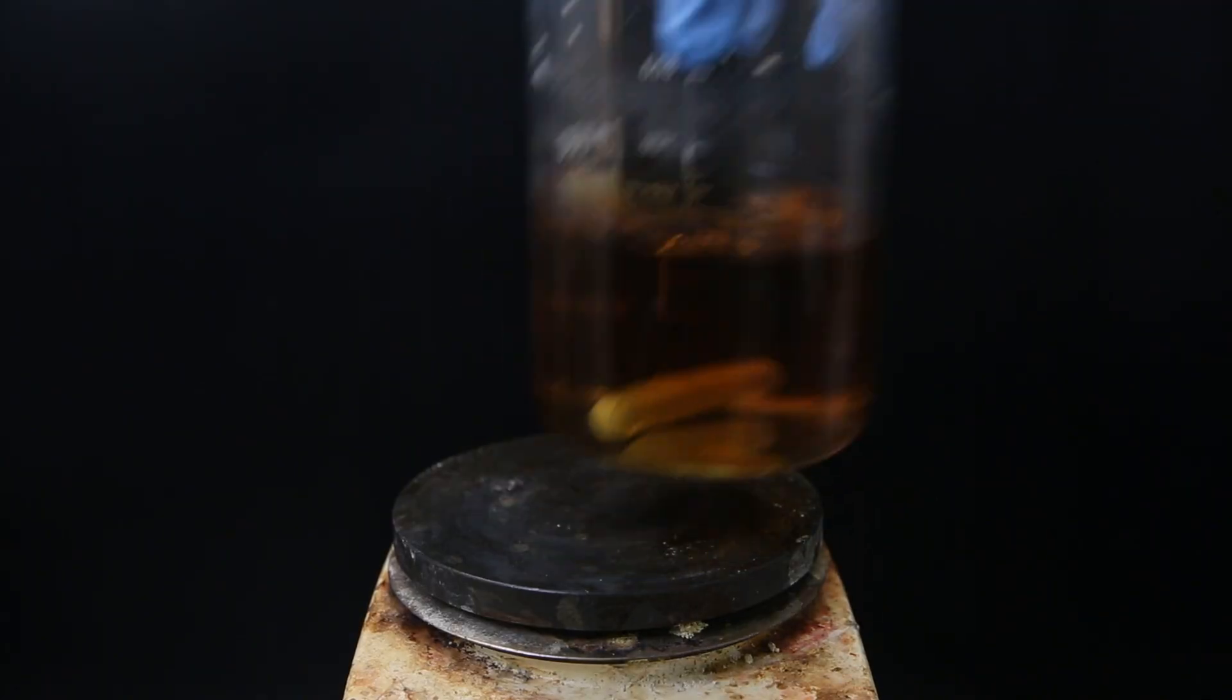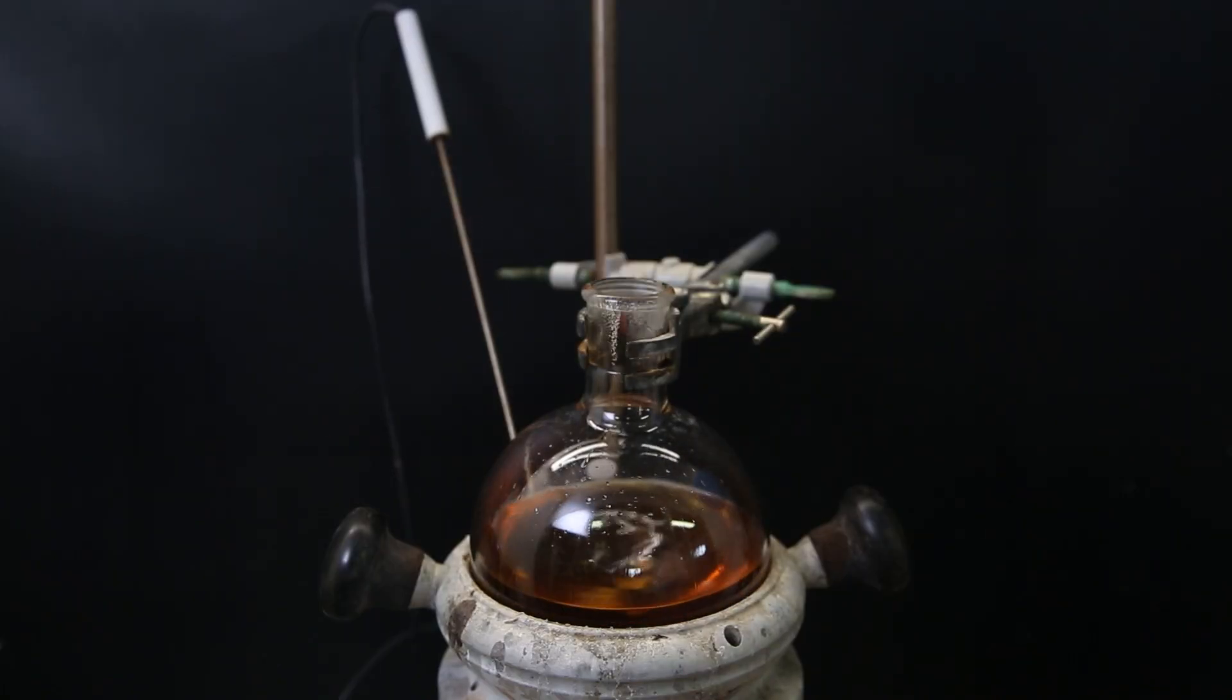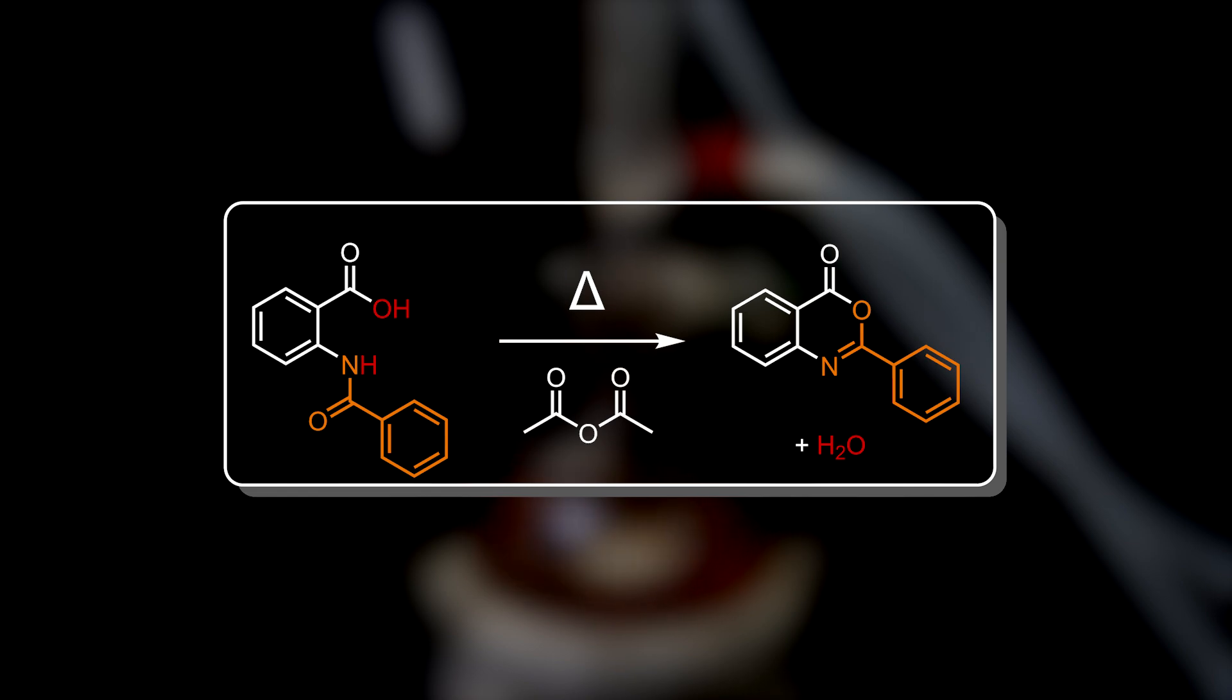When all of it has dissolved, I move it to this flask in a heating mantle, attach a condenser, and boil this solution for one day. This reaction is a thermal process, for which acetic anhydride is a convenient solvent, as it destroys water that is formed in the reaction.